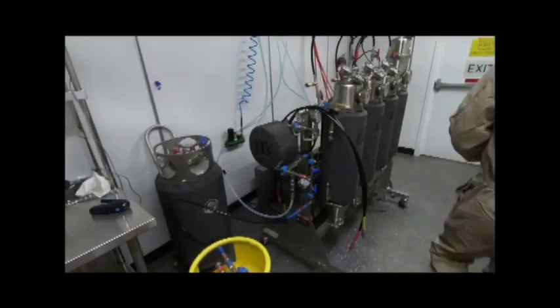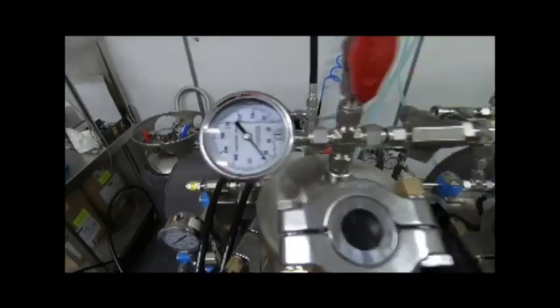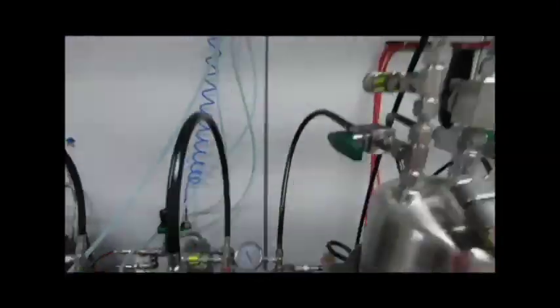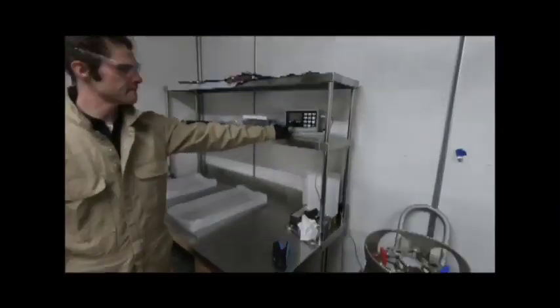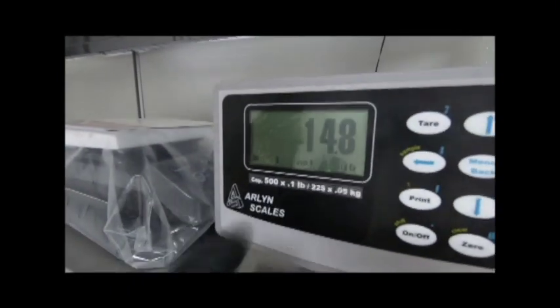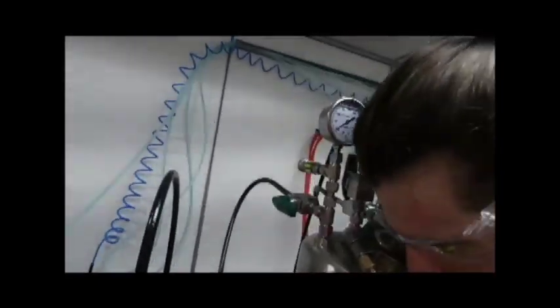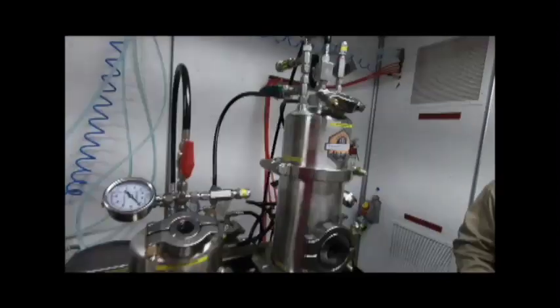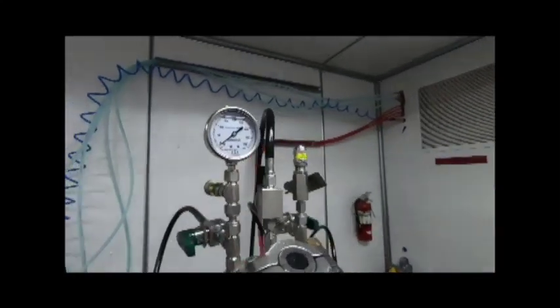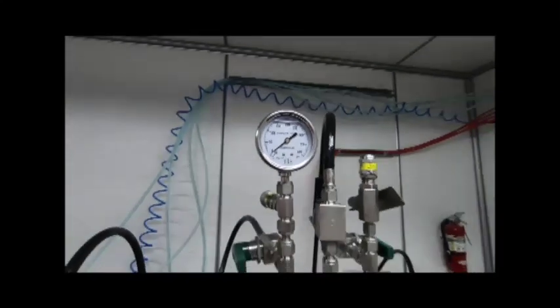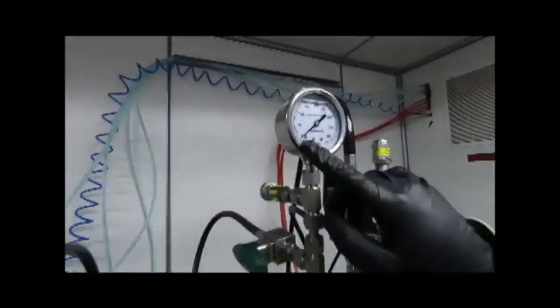Consistently monitor temp, pressure, and flow of all available platforms. Notice scale moving up in weight as gas is being recovered in the operation. You can also run under pressure gauge at the top of the collection column to assist if you're unsure slurry is ready for recovery. Pressure gauge will begin to drop past zero into negative pressure once all of gas has been removed from slurry.